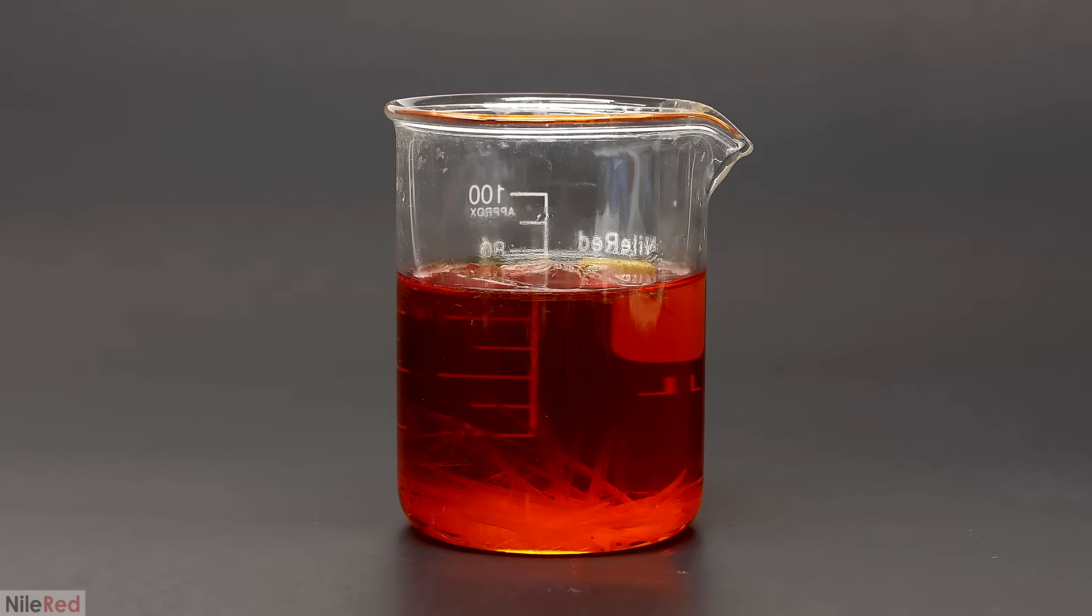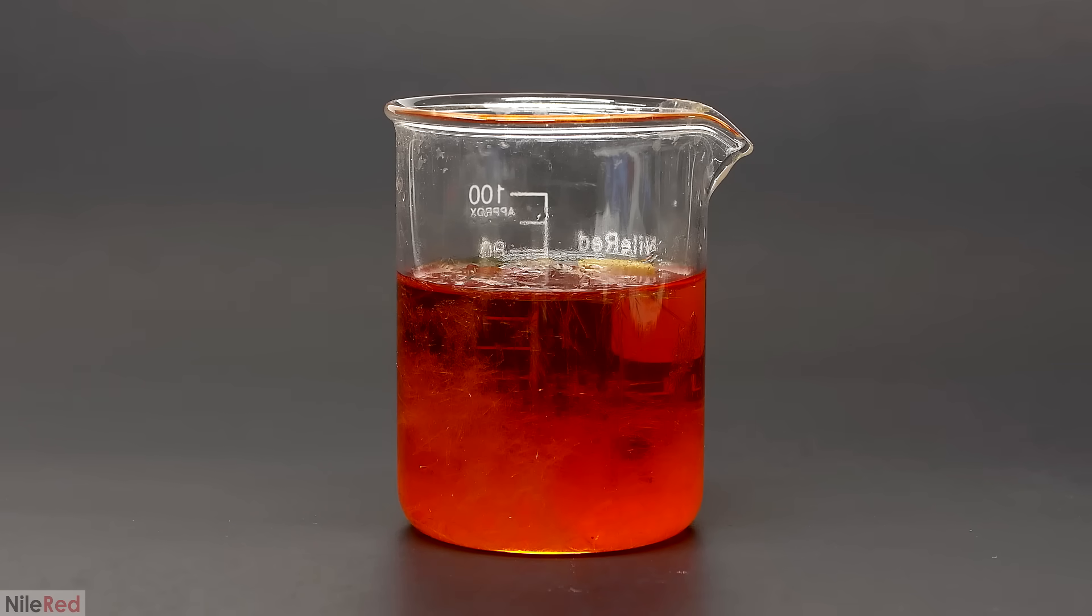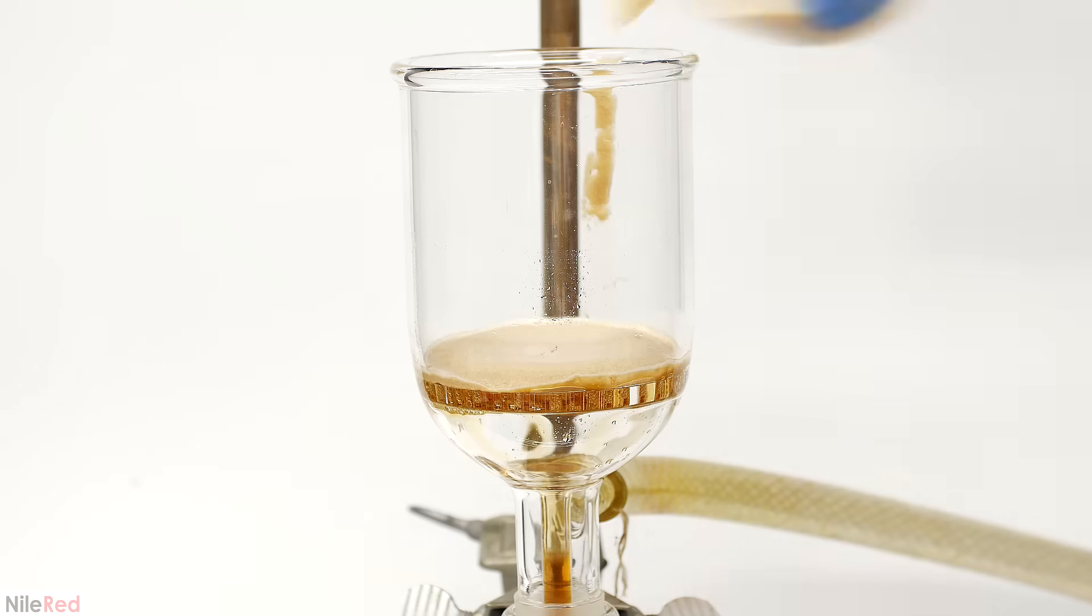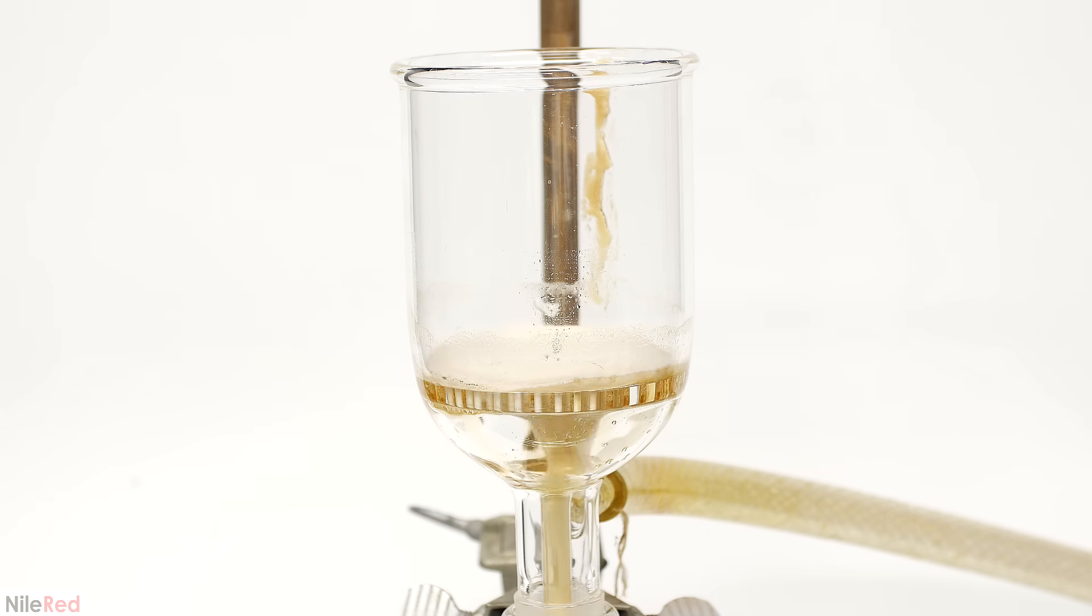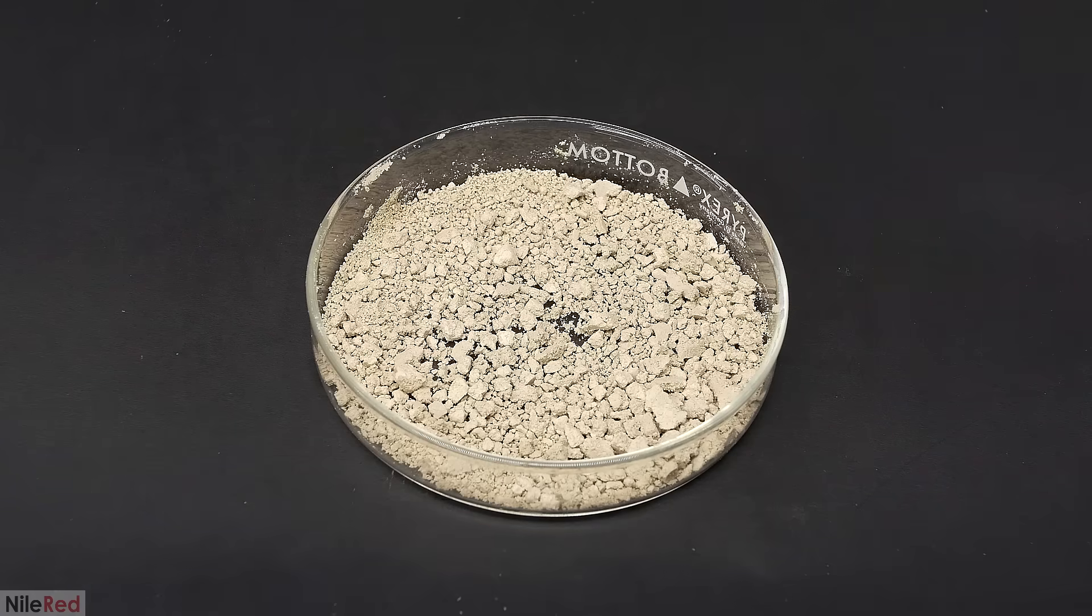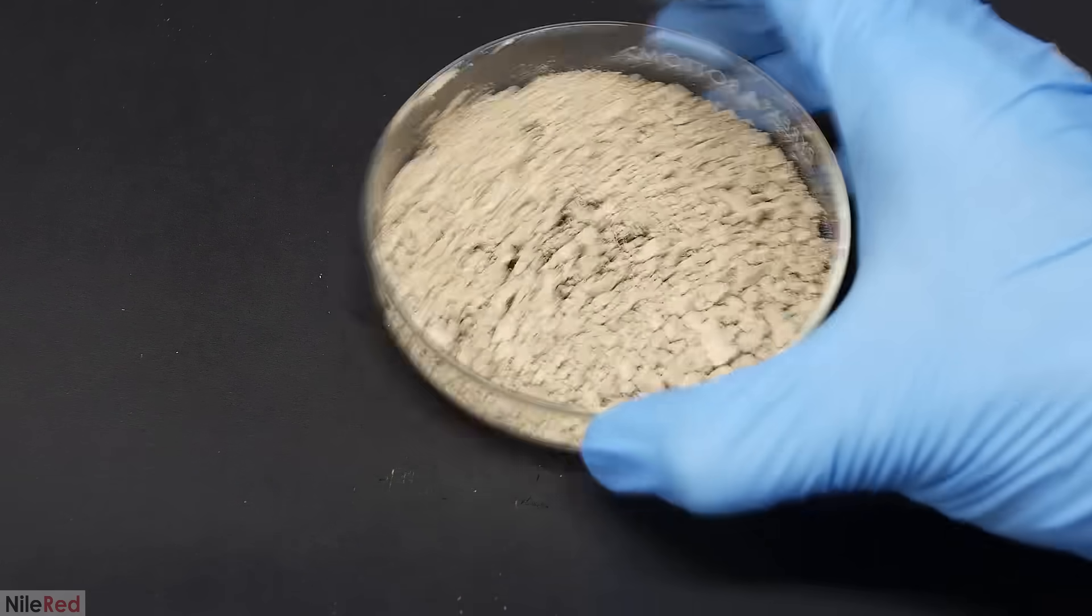so it's kind of a trade-off between recovery and purity. In my case, I'm using it for synthesis, so it has to be reasonably pure, and I didn't really have a choice here. If you recall from earlier, I filtered off some pee proteins and minerals, and I decided to keep them. I let them sit out for a few days to dry, and this is what I was left with.